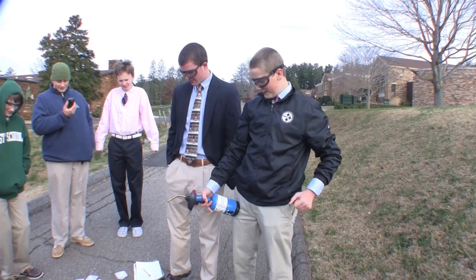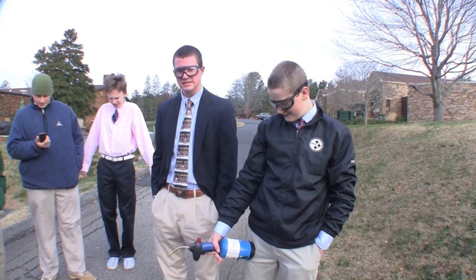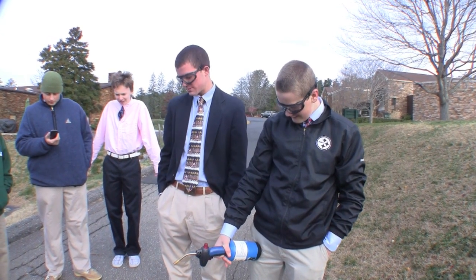What are you guys doing? We're burning napalm. We've made some napalm from extruded polystyrene plus gasoline, and we're going to see how long three grams of it will burn.